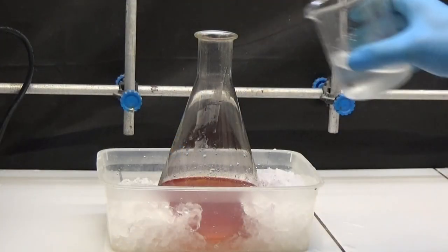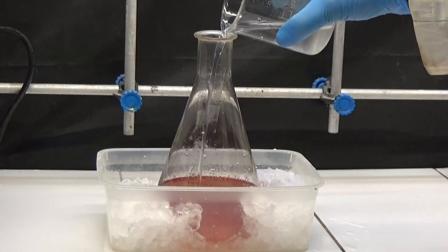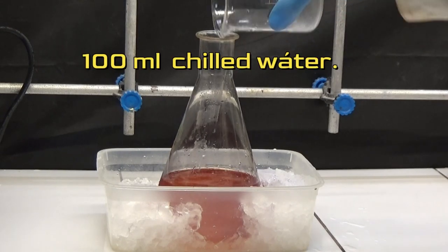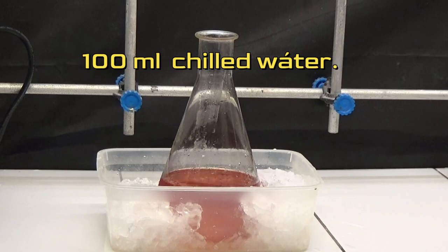The ether solution is mixed with the aqueous solution and cooled with ice. Add 100 milliliters of chilled water.